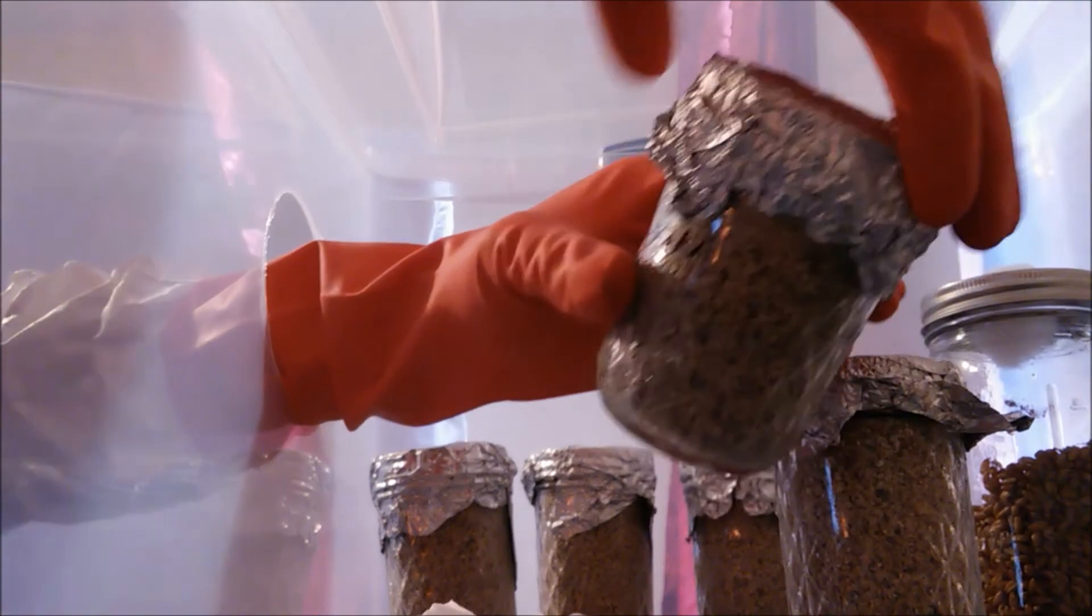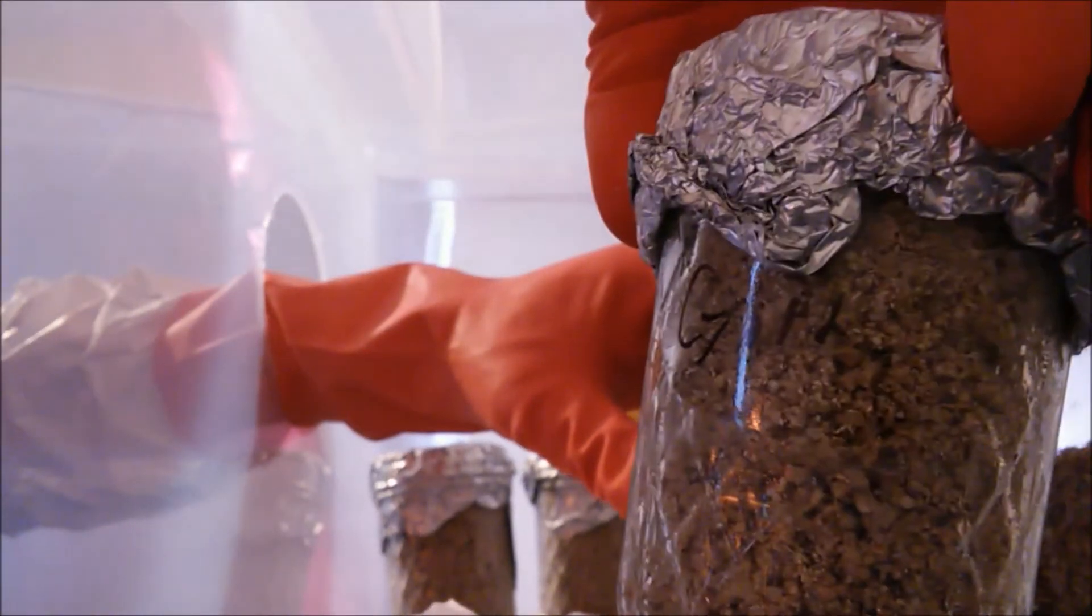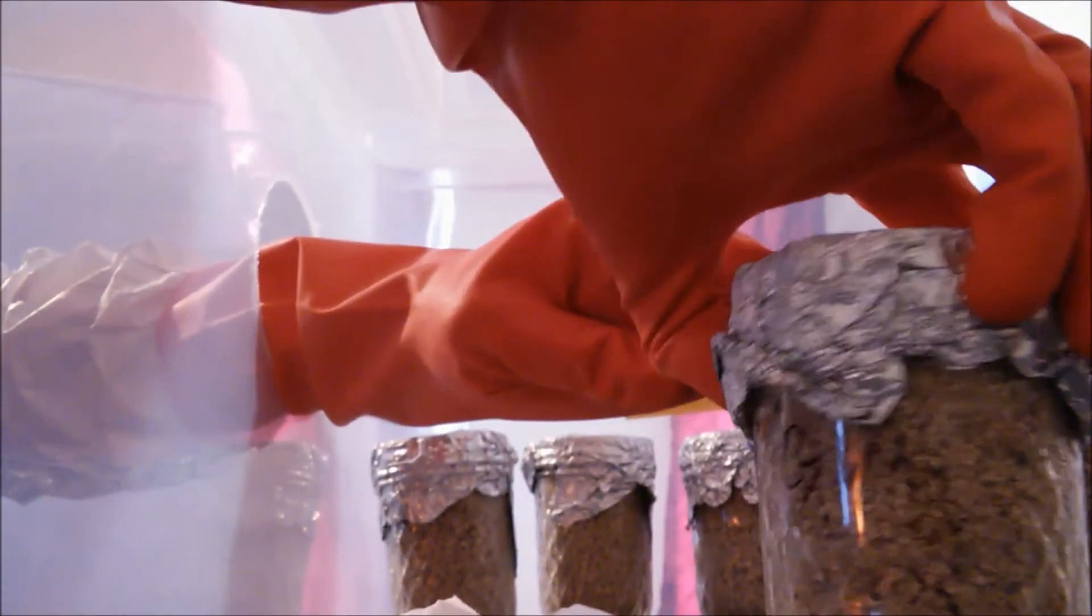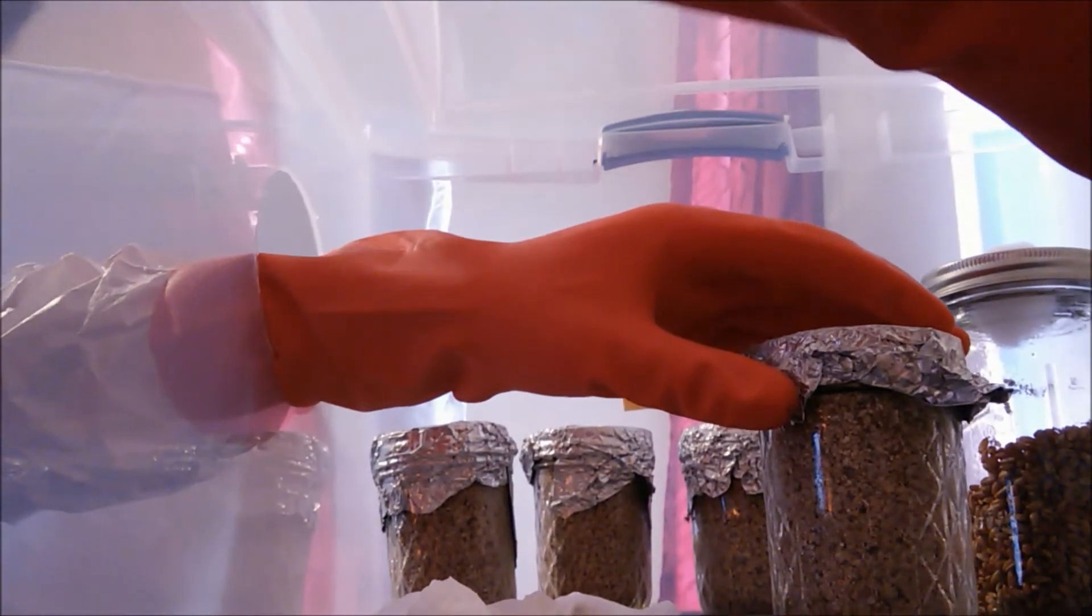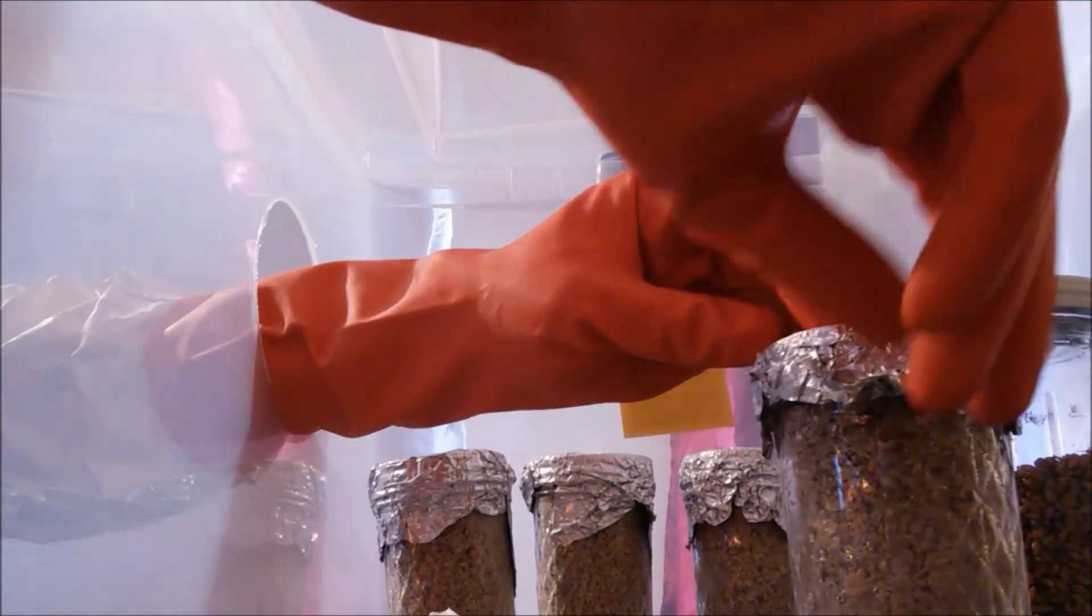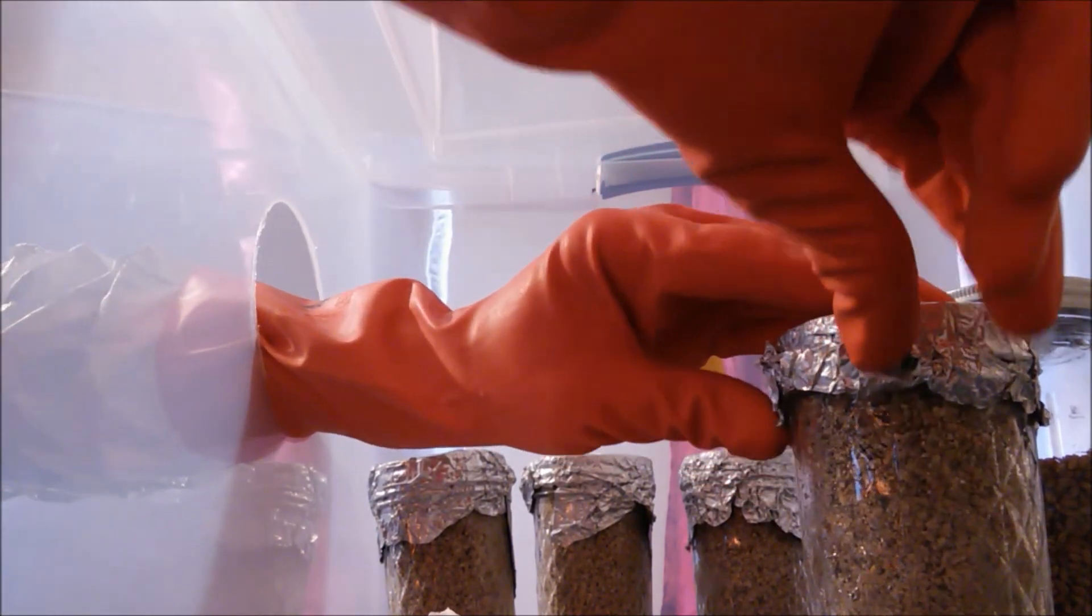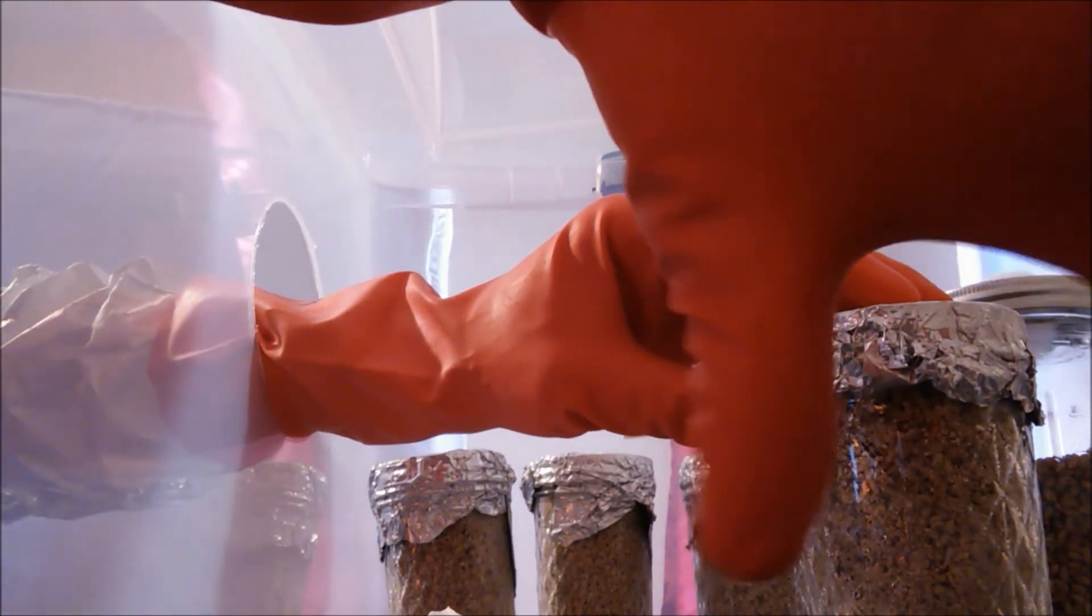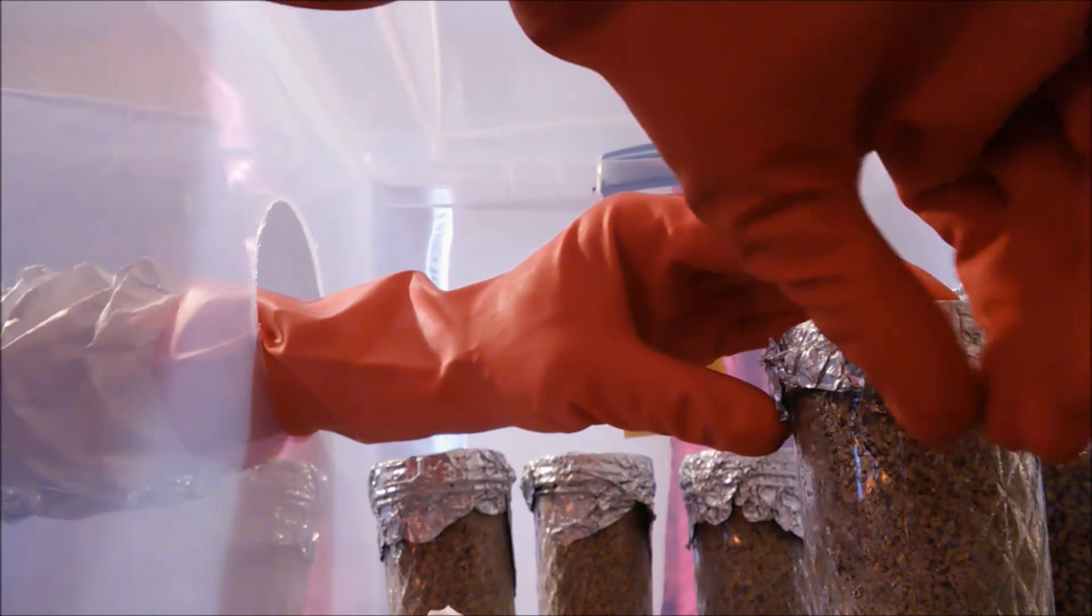Once you're done injecting your jar, just cover it back up with the aluminum foil so nothing can get back in. Leave it in a warm area, a little bit warmer than room temperature, to incubate and watch until the mycelium runs across the whole thing.